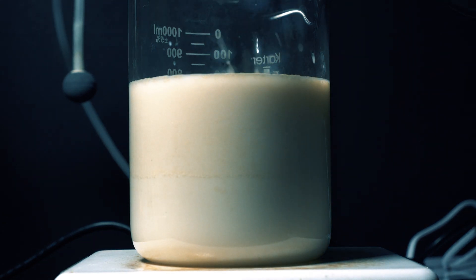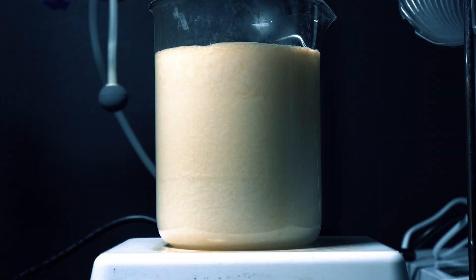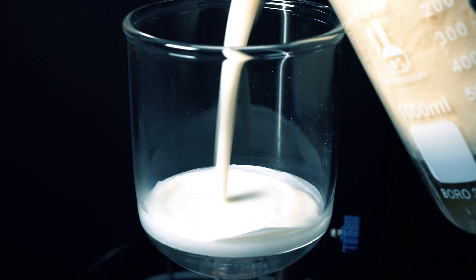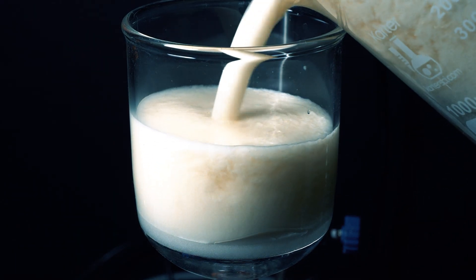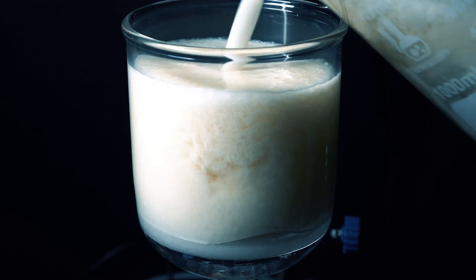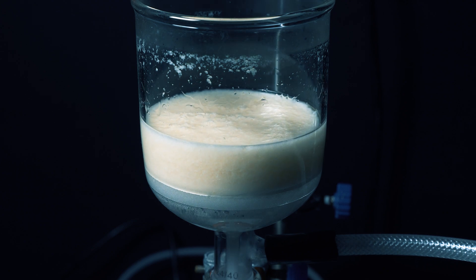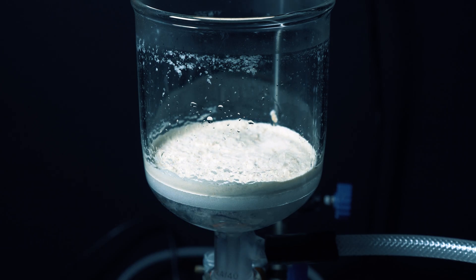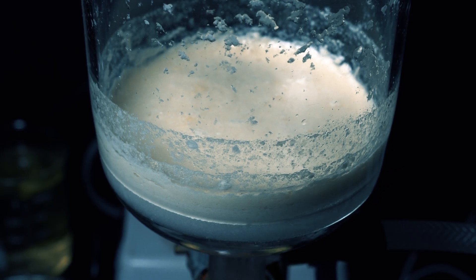Or the reaction didn't work and I was very sad. Though, I got this beautiful vanillin cherry smell, which is a characteristic of piperonal. Once I felt like nothing else came out when I poured water in, I decided to do a vacuum filtration. As I was doing the vacuum filtration, that beautiful aroma became more pronounced and it was really, really good to smell. It looks like we have a lot, but it's also fluffy and the second I pull the vacuum, it all condenses together. I also decided to wash it out with water, as we don't want any hydrogen peroxide or other impurities to be in there.